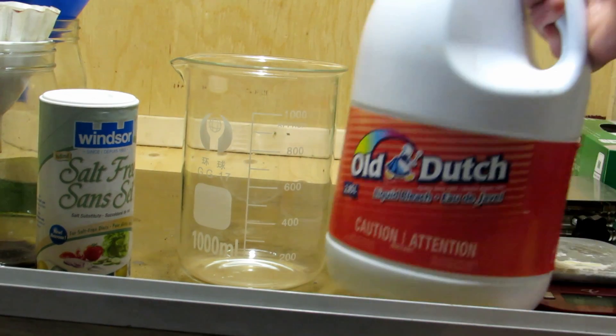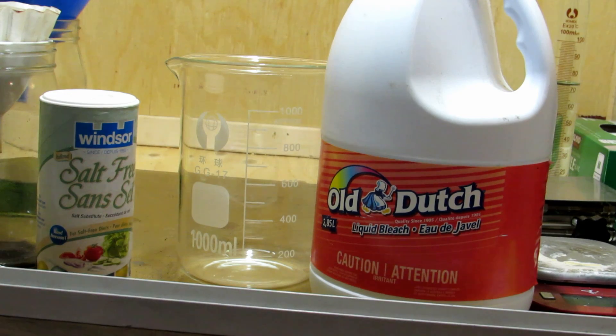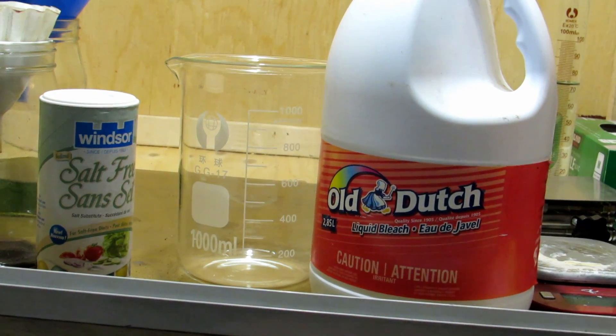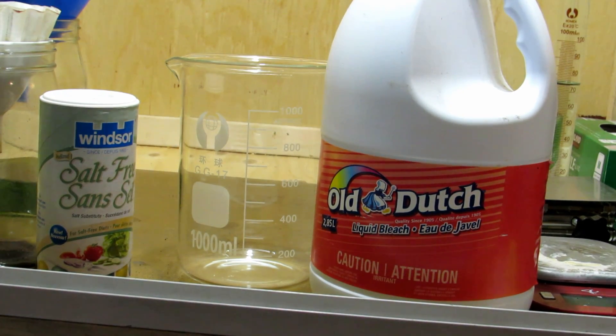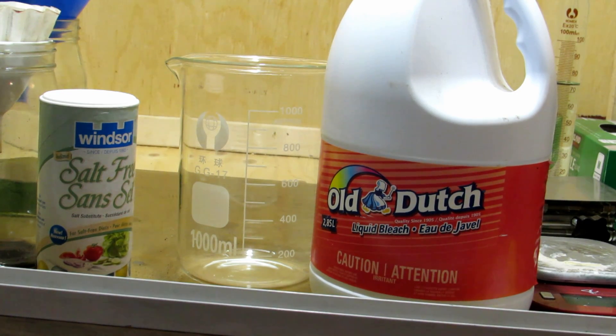This bleach here does contain sodium hypochlorite. It's not a full bottle but that shouldn't matter. I'm going to first turn on my fume hood so that dangerous bleach fumes, well they're not too dangerous, but my room doesn't get filled with bleach fumes. Then we'll take this one liter beaker here and fill it up to probably between 800 and 1,000 milliliters of bleach. Then we're going to boil it down. So I'll measure out some bleach and meet you back.